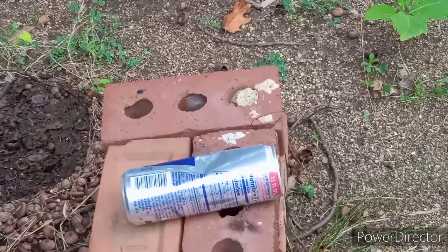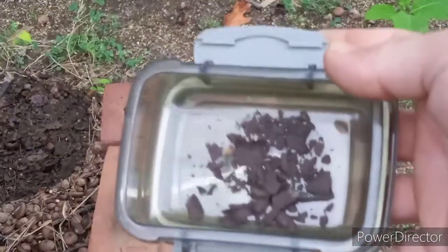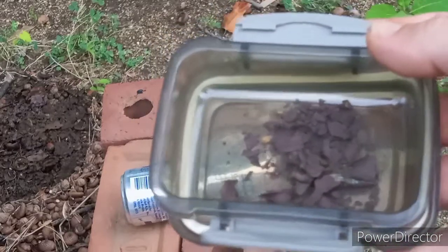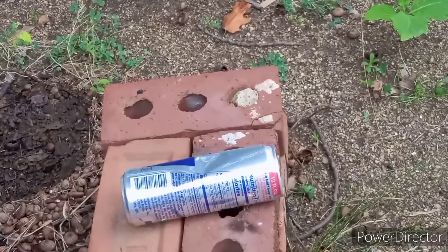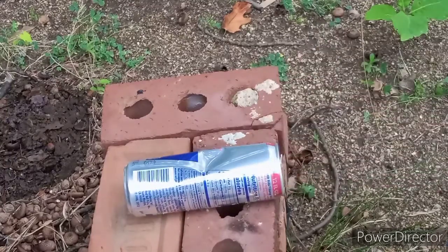Good evening guys, just testing this compound here and I thought it was pretty interesting so I'll show you guys. This right here in my hand — if you can see it — that is what copper 2 azide looks like. I'm really liking this stuff so far. I got a can set up there, you see the little divot in the can, I put that there specifically so that I can just hold a piece of this right there for you guys. This stuff is pretty free.